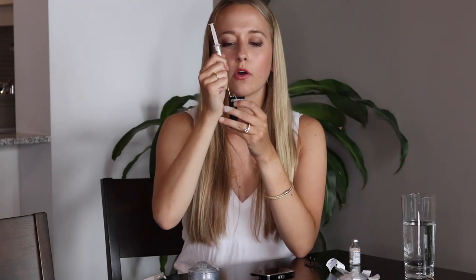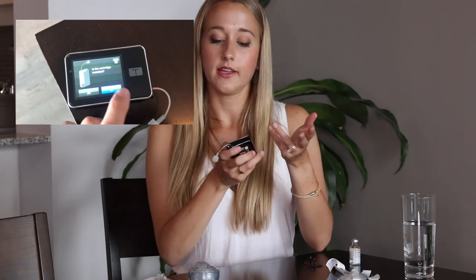I stick the needle into the cartridge again — it will only go about halfway in. Then I slowly push down on the plunger; you'll feel some resistance, but that's totally okay. Slowly push down, then pull the syringe out. Your cartridge is now full. We go back to the insulin pump — it says to press the unlock button when completed. Then it asks if the cartridge is installed. You simply slide it in and it clicks in — super easy. I confirm yes, the cartridge is installed, and it begins detecting the cartridge.